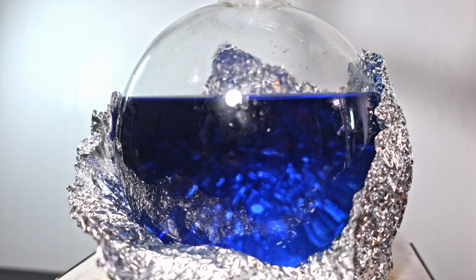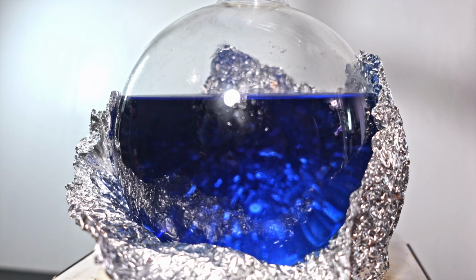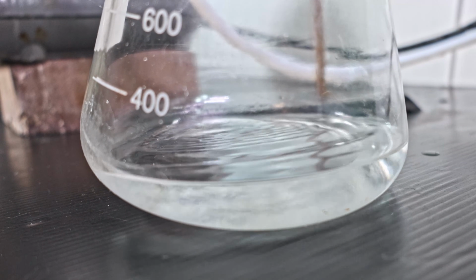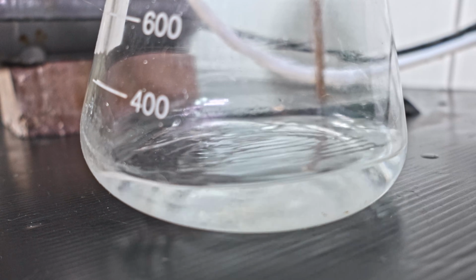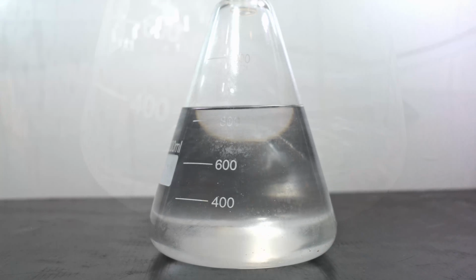While you can do this successively, where you boil off methanol, switch, and then boil the nitromethane, it is a bit of a guess where the cutoff is, and you can lose nitromethane in the methanol. It already forms an azeotrope at 9%, so you definitely don't want to lose more. After, I get a little over 800 milliliters.